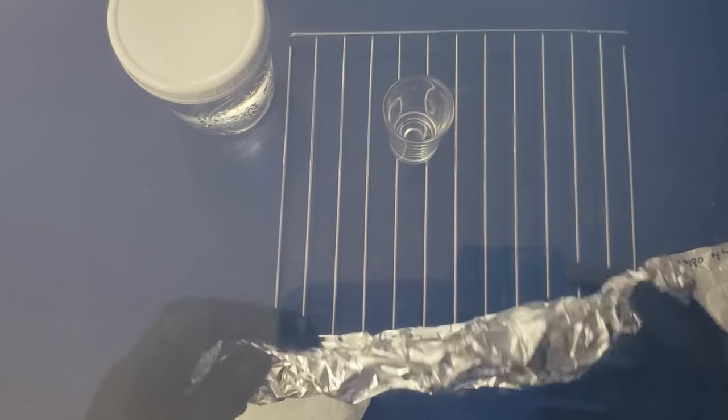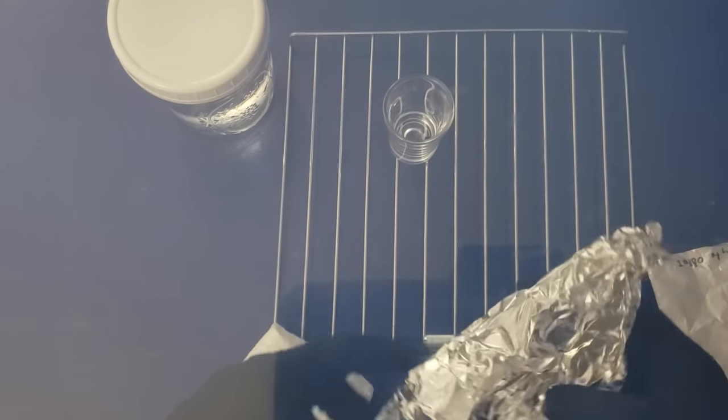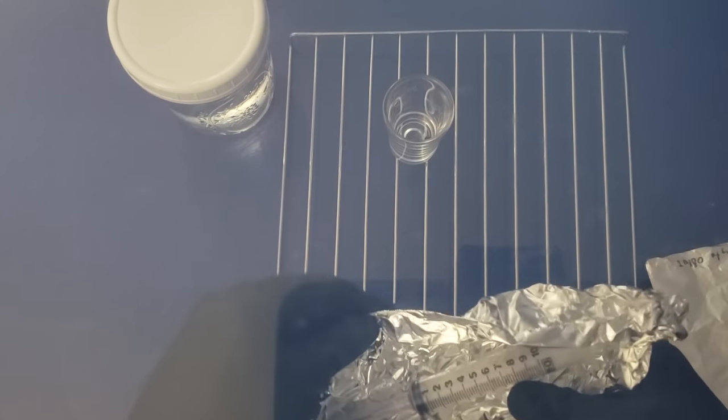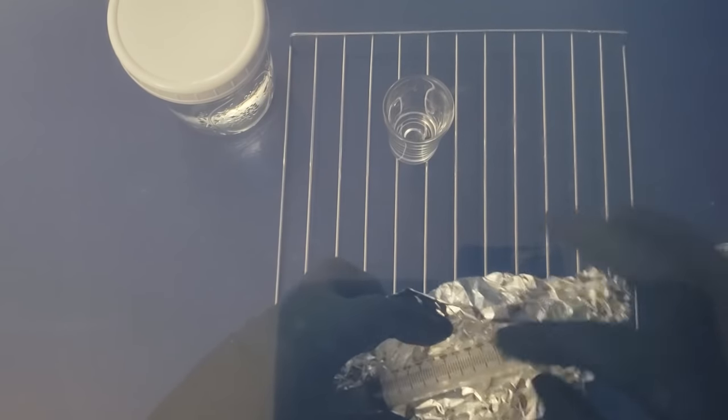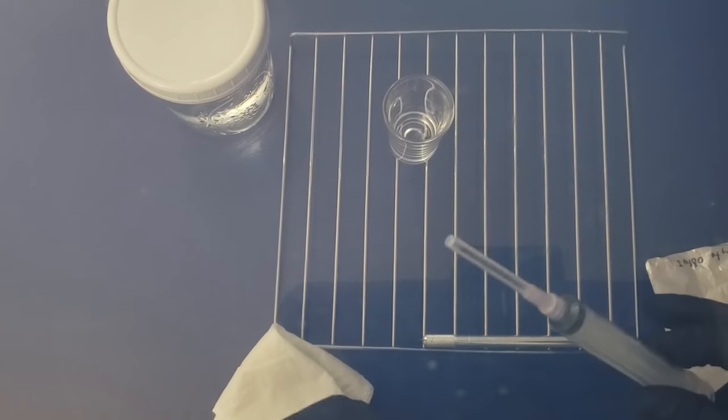All right, with the spores in the shot glass, we'll go ahead and remove the spore syringe from our foil here. Now we have a nice clean sterile spore syringe to work with.